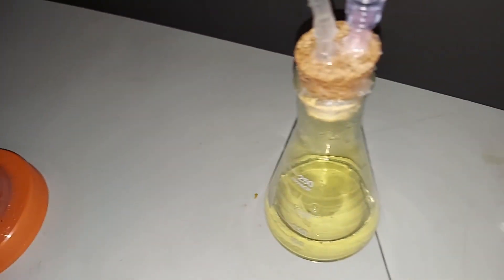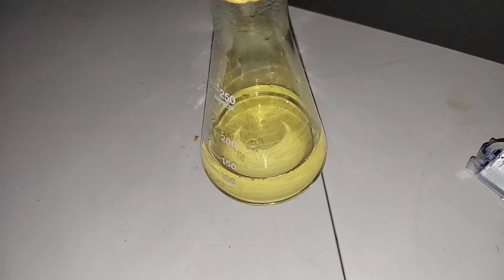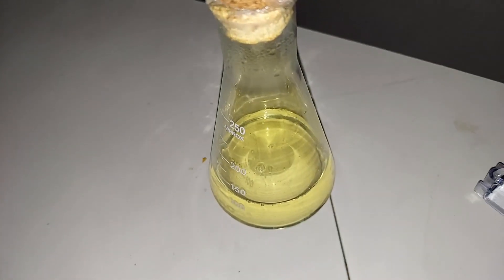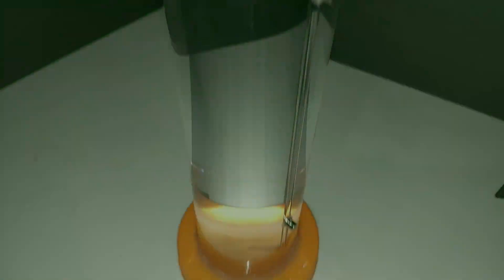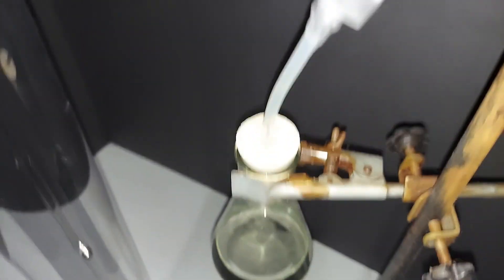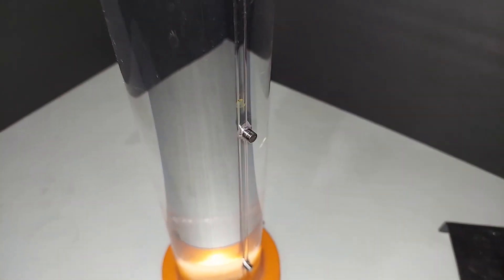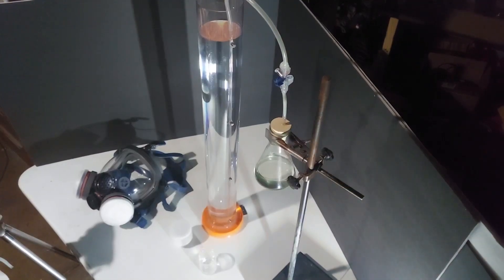With the bleach and hydrochloric acid, I knew it was going to take a lot of pressure to push down the water column all the way so the chlorine gas could come out the bottom. When I was testing this, the chlorine gas built up but it leaked somewhere, so I'm ditching this setup completely. I'm going to put the bleach in another flask with a rubber stopper and a single tube coming out, then put the hydrochloric acid in, rubber stopper it, and have a simple system. I put new silicone on and now have a single tube. I also put a valve here — once I add the hydrochloric acid, the chlorine gas can push through. Since this tube is filled with air due to the valve, as soon as chlorine gas forms it'll push the air out right away without having to push against the whole water column.